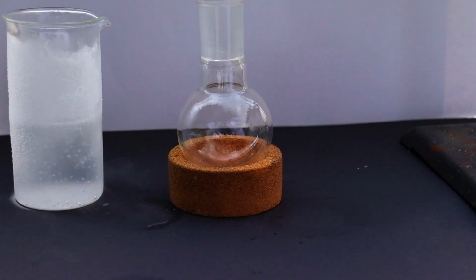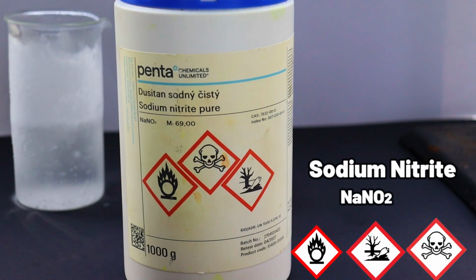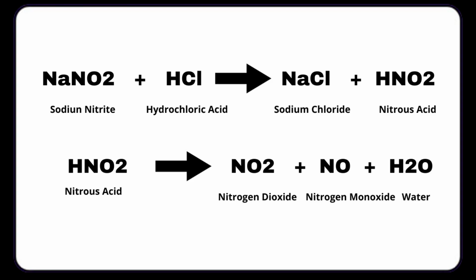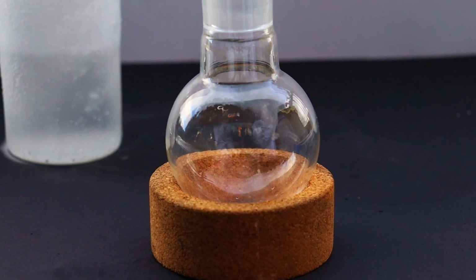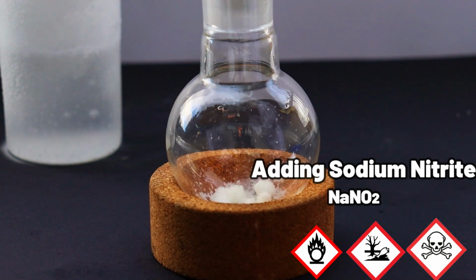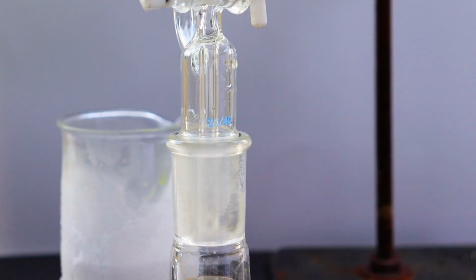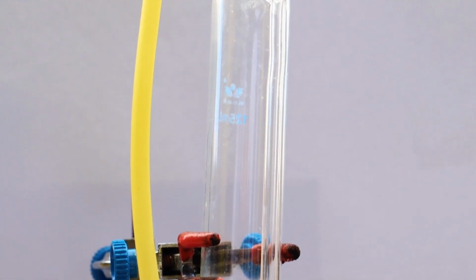To make the brown nitrogen dioxide, we will use the reaction of sodium nitrite and an acid. This reaction produces highly unstable nitrous acid that quickly decomposes to nitrogen dioxide. The acid will drip on the nitrite and produce nitrogen dioxide, which we can later, with the help of this apparatus, feed into the cold trap to liquefy.